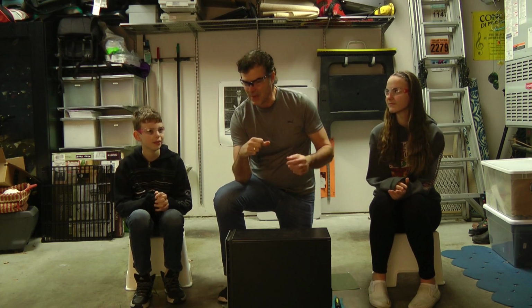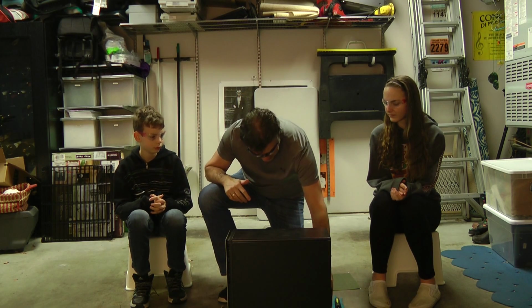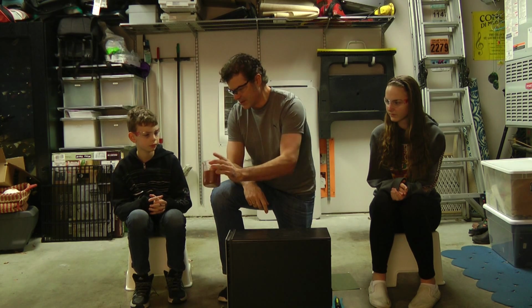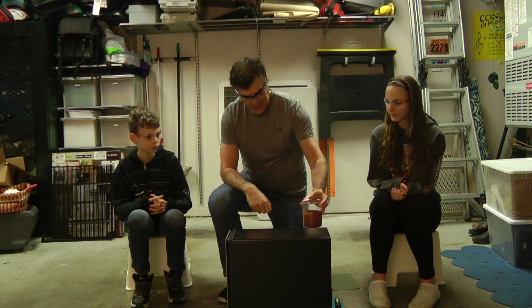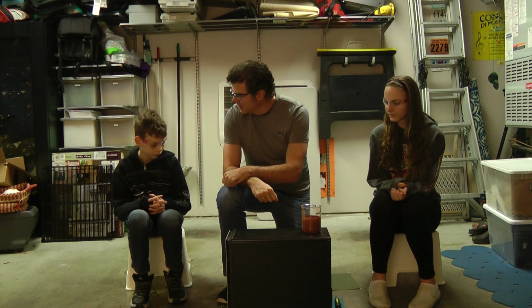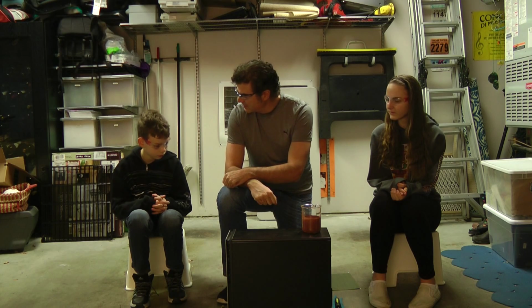Iron and water. It's iron and oxygen. Oh. So when you expose iron to water and air, the oxygen reacts with the iron and forms that reddish-brown compound, right? And so we have some iron oxide here, red powder, and what I'm going to do is mix that iron oxide with some aluminum powder.